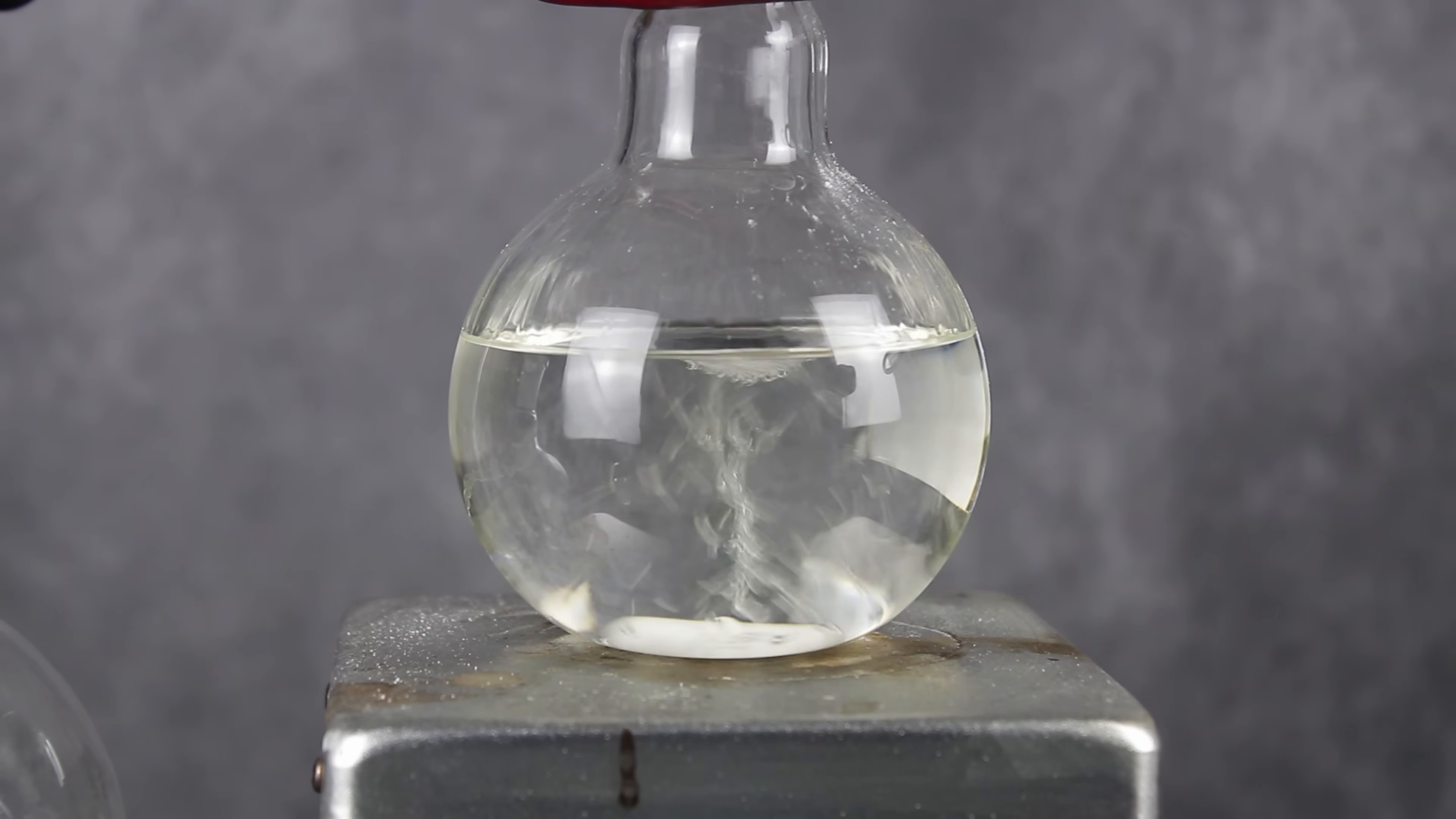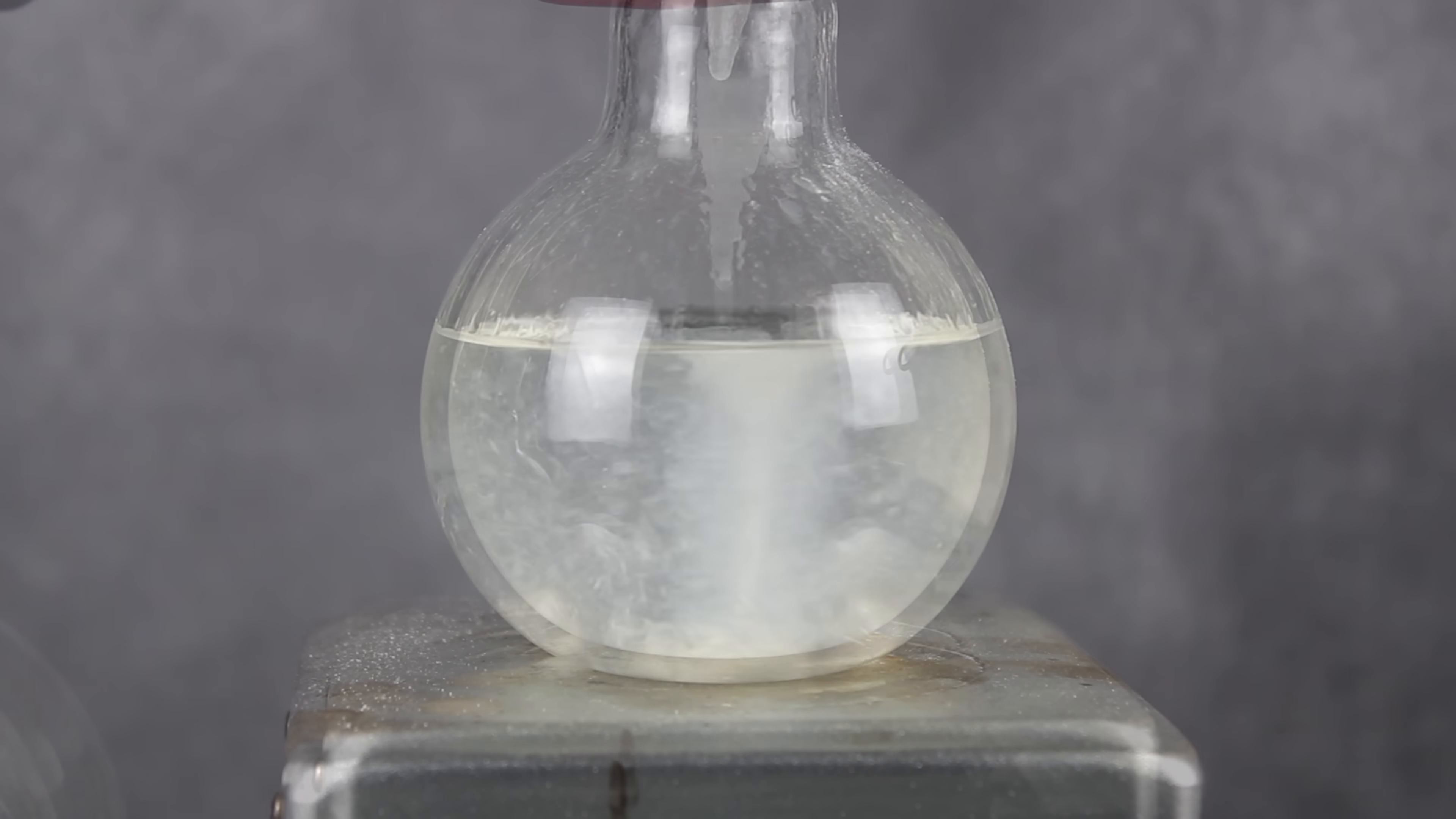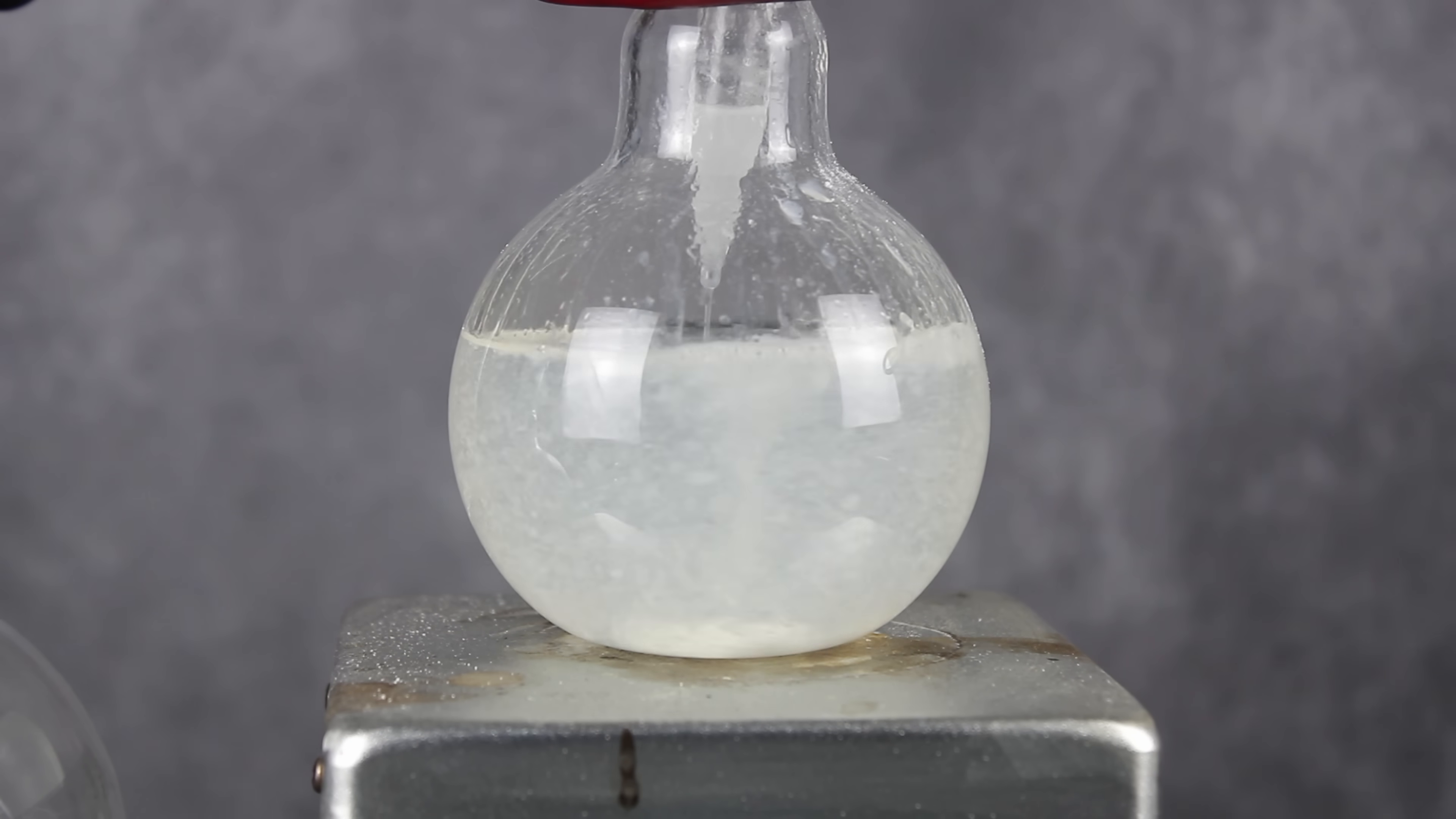Unfortunately for me though, I forgot almost all this critical knowledge in the heat of the moment, and tried neutralizing the hot ester solution with concentrated sodium hydroxide. This likely destroyed a lot of the ethyl nicotinate.